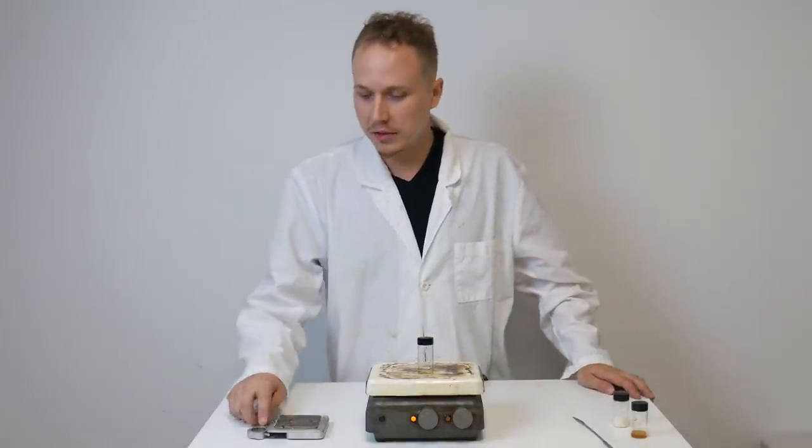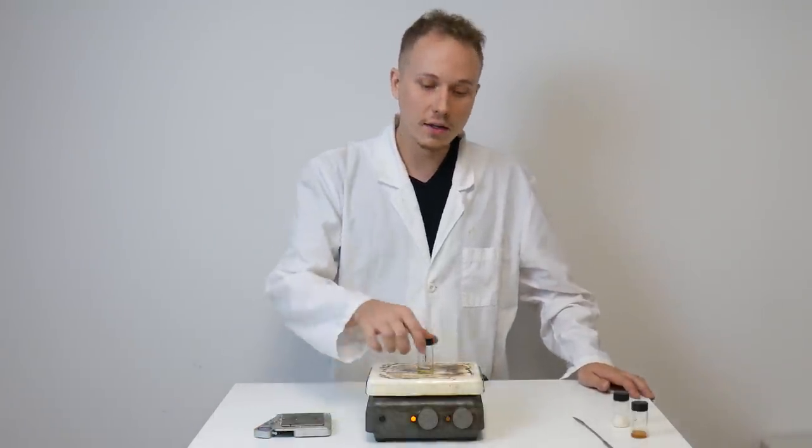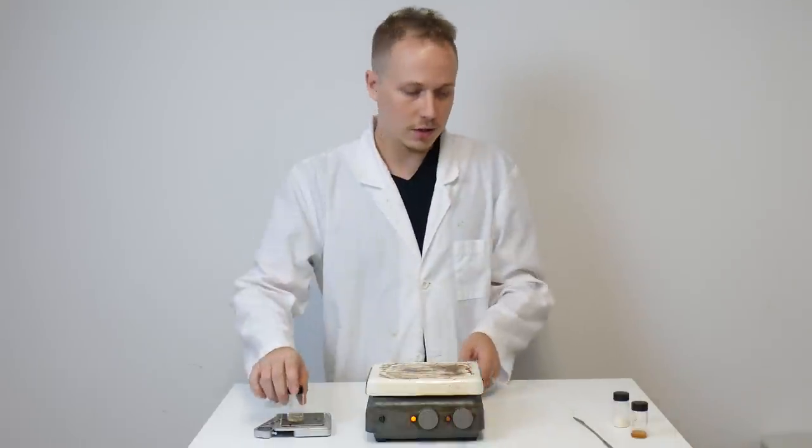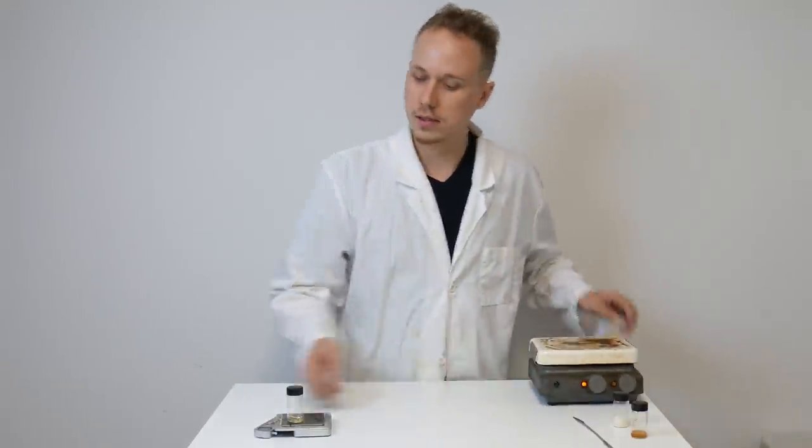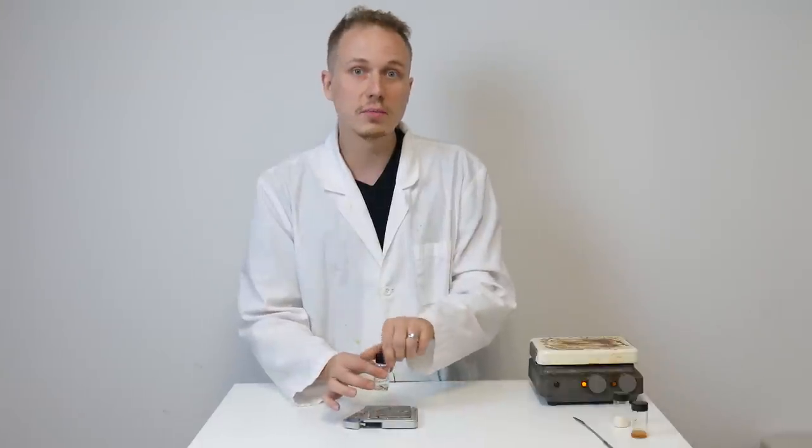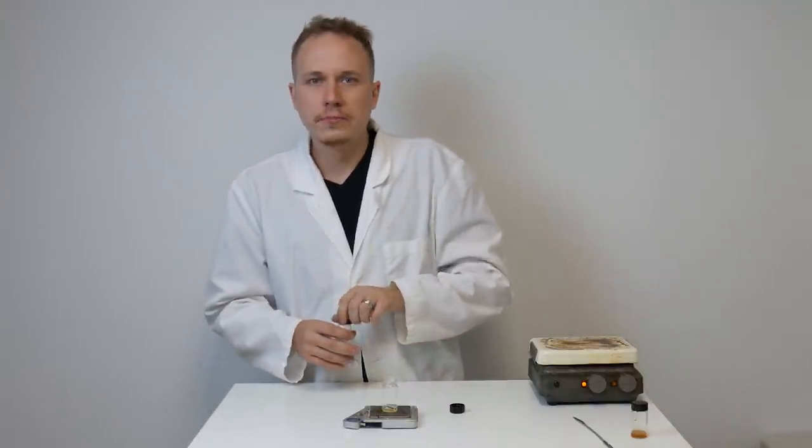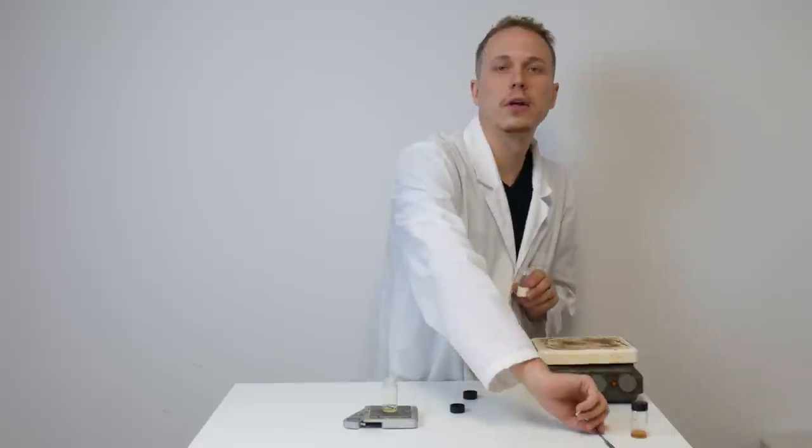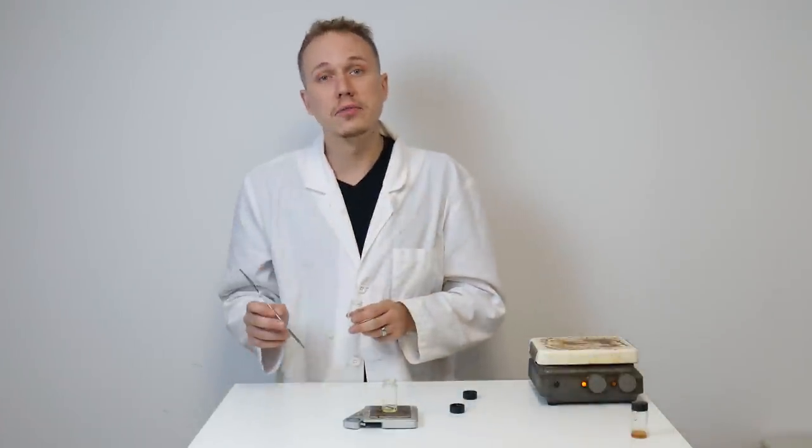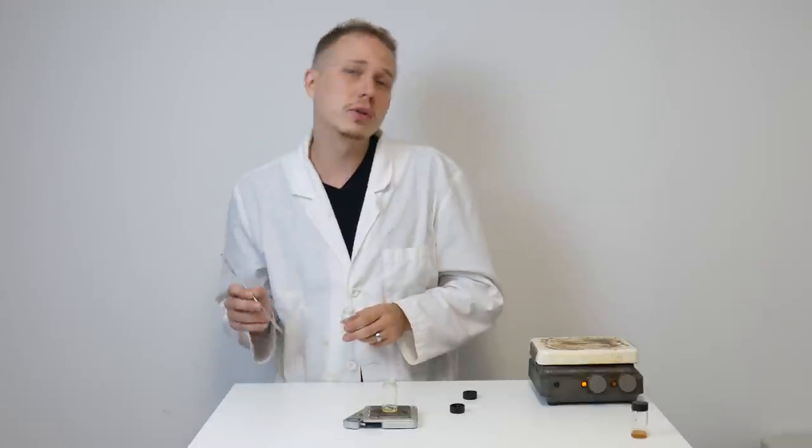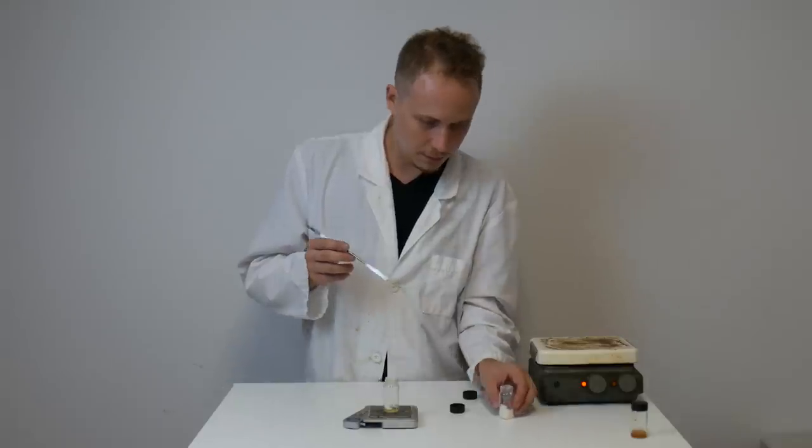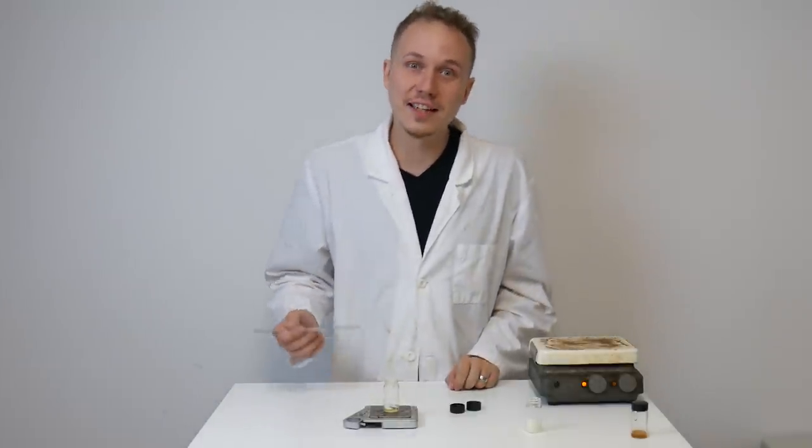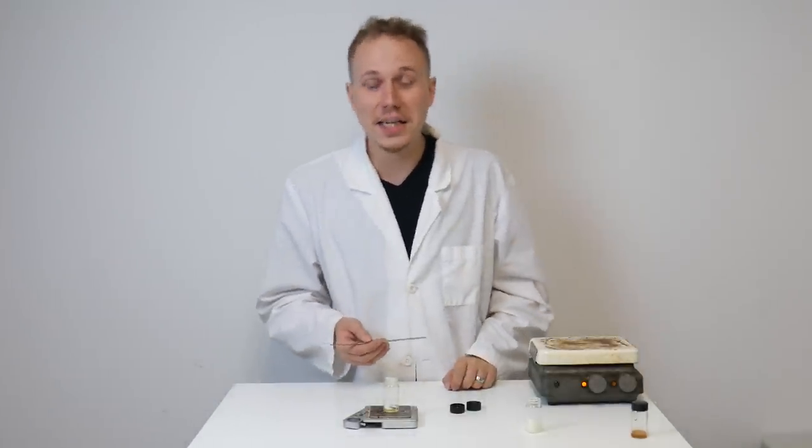After it's done decarbing, I'm going to go ahead and put it back on the scale. Turn the heat way low on the hot plate. And I'm going to add in some THCA. I'm going to do about half as much THCA as I did THC. So there's 0.8 grams of THC in there. And I'm going to do 0.4 grams of THCA. Alright, so there we go. The THCA is added to the THC.